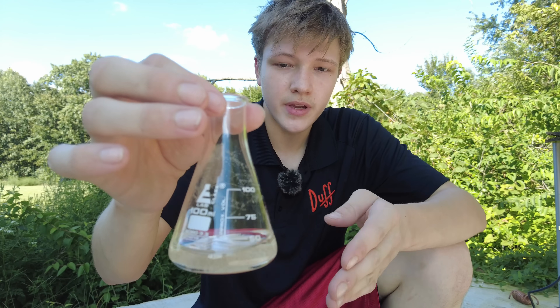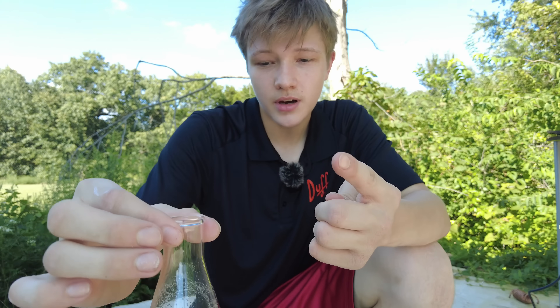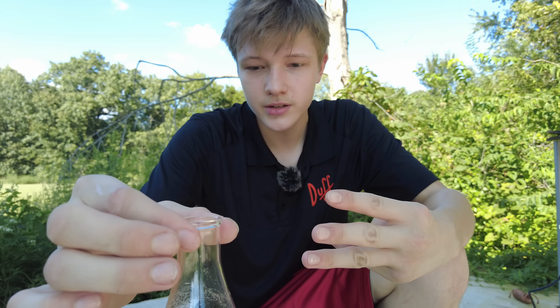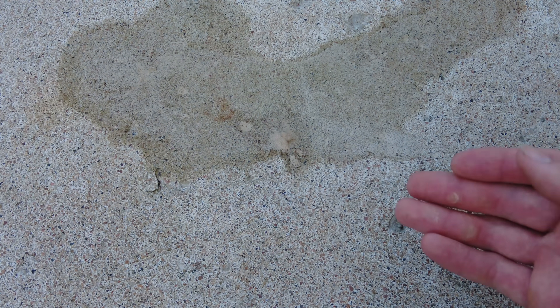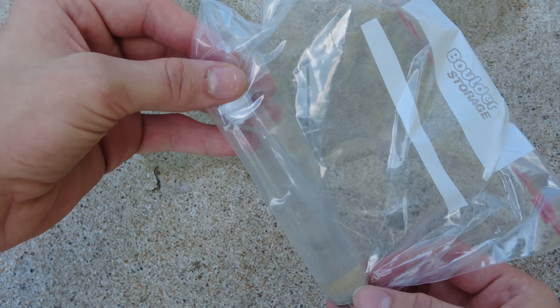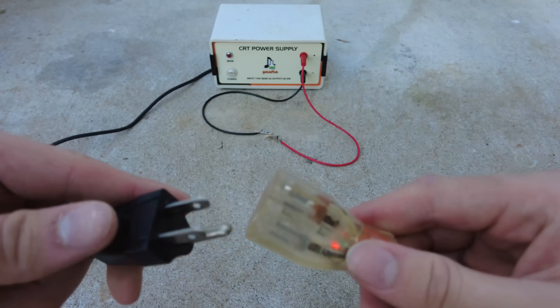It's finally time to make it go boom and I'm going to make it go boom in a few different ways. Electricity? A hammer or something? And I want to see if my laser pointer can generate enough heat to detonate it. But before we do that we need to let it dry out, because it's pretty insensitive to all those things when it's wet, which is also why it should be stored in a container with water, and also in a place where the water is not going to evaporate.